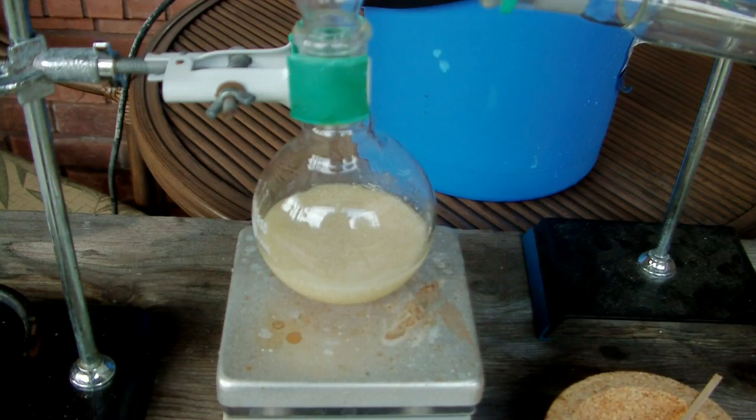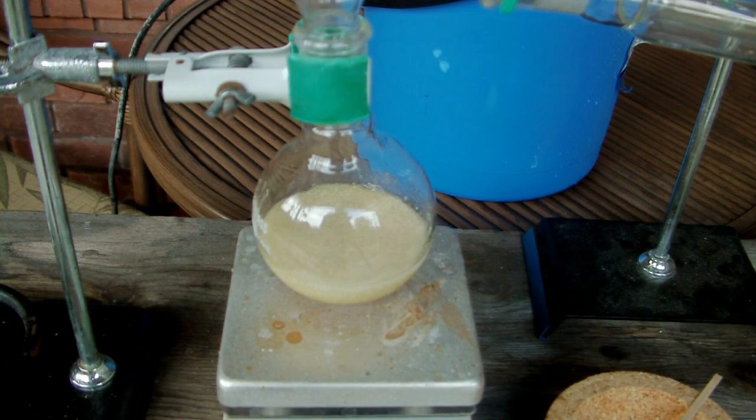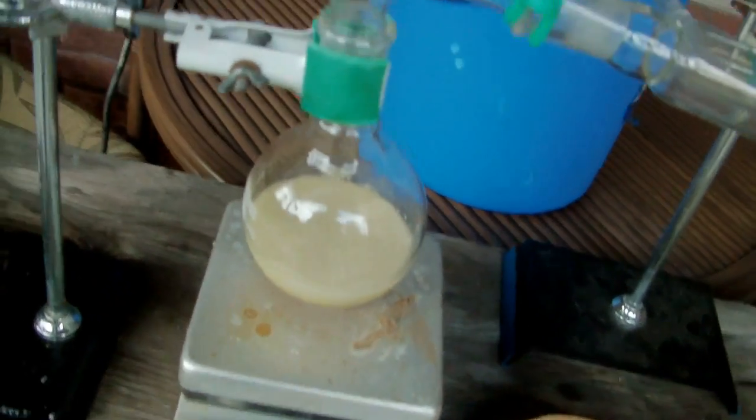Okay, I've got everything set up now. And it turns out the amount of sulfuric that I used actually was enough to cover all the prills of ammonium nitrate. So that works out. So before I start, we'll just go over the setup.